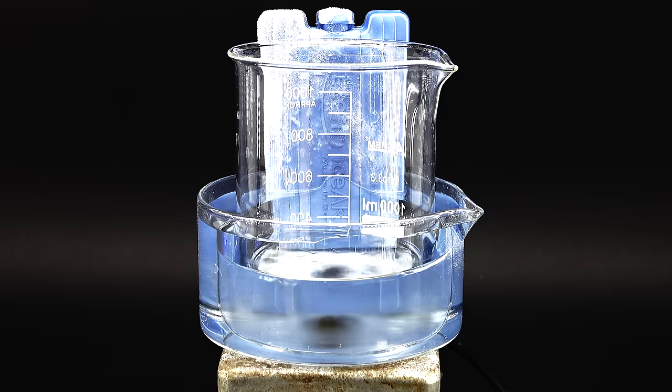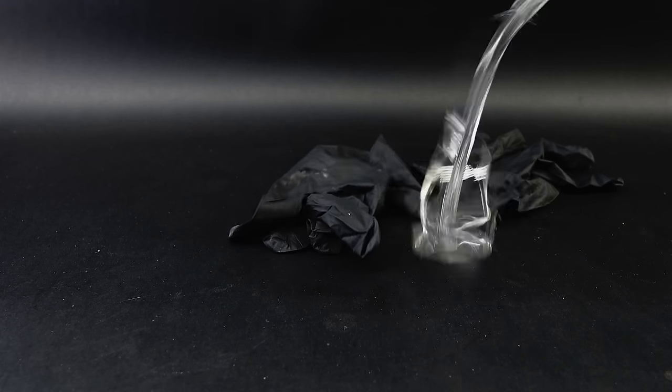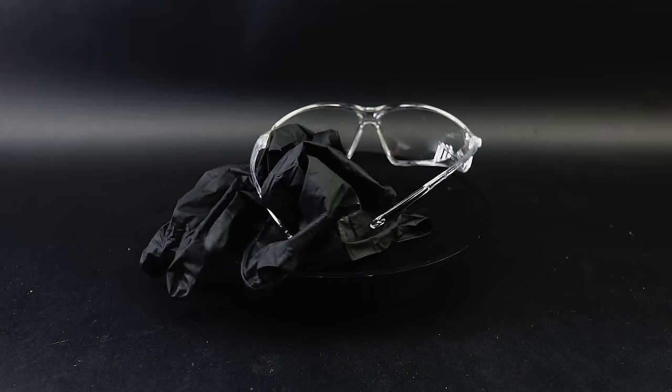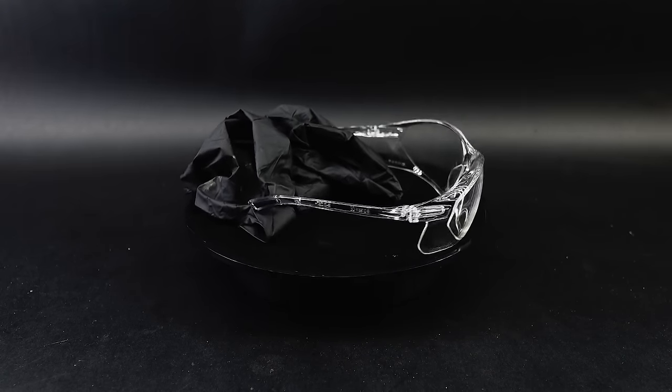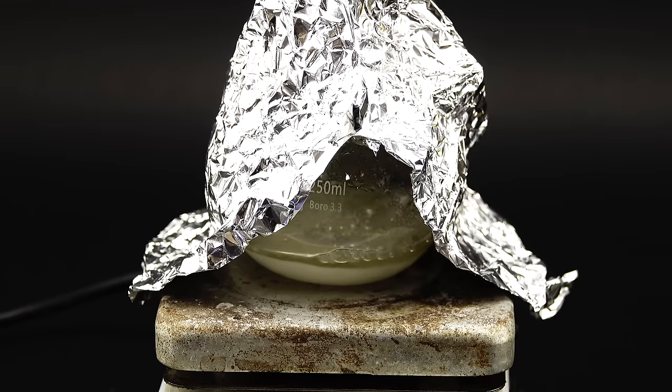Anyway, before beginning to make rocket fuel from cleaning supplies, I first have to take a lot of safety precautions since I want to live long enough to publish this video. The most important one is working in a good fume hood to suck all the nasty hydrazine fumes outside. Another very important thing for me is wearing gloves and safety goggles at all times to minimize any potential exposure to hydrazine. Even with all the safety gear, I still felt quite nervous about making something so dangerous.